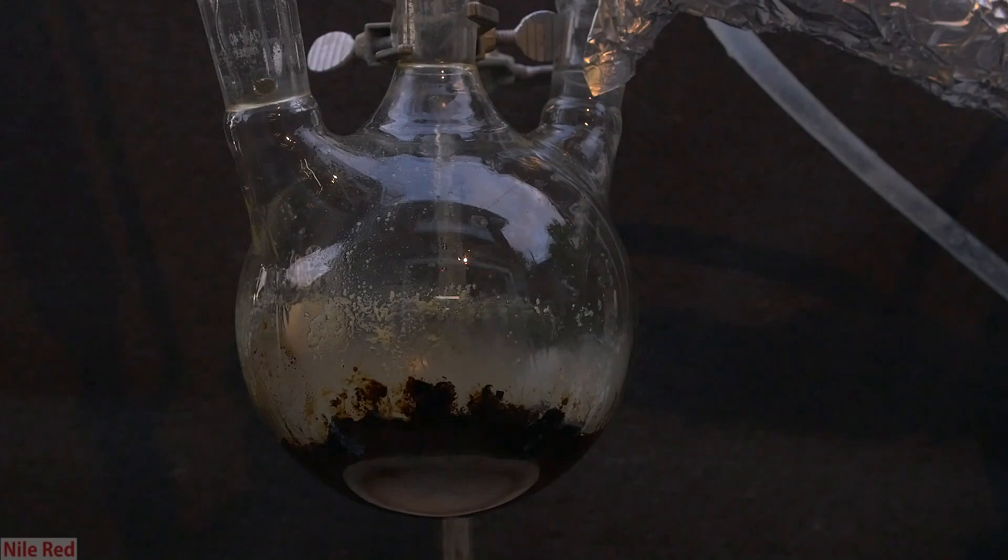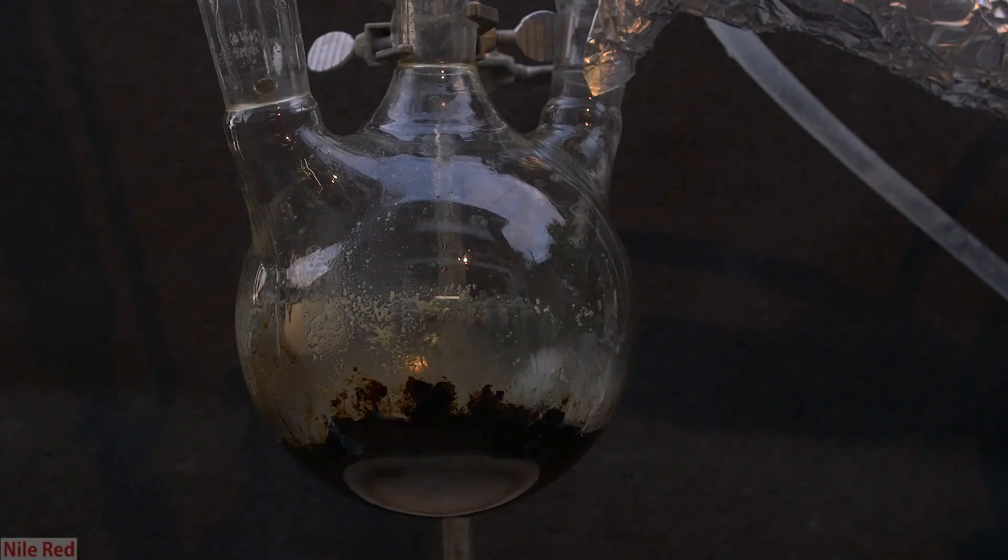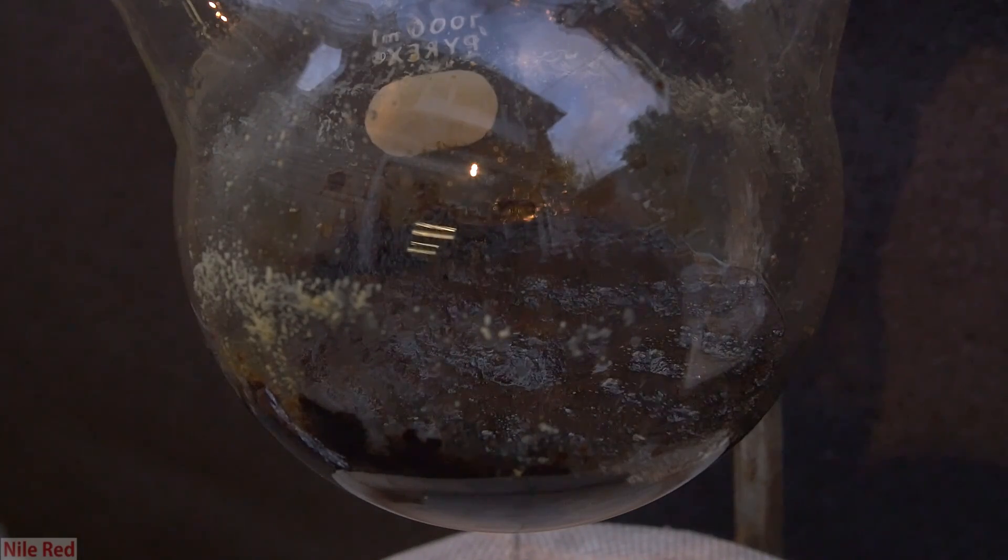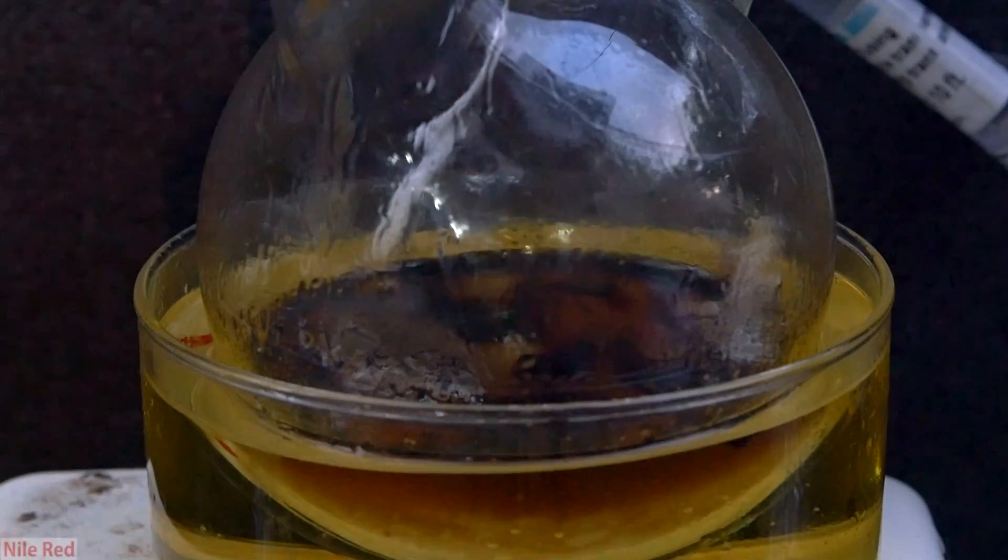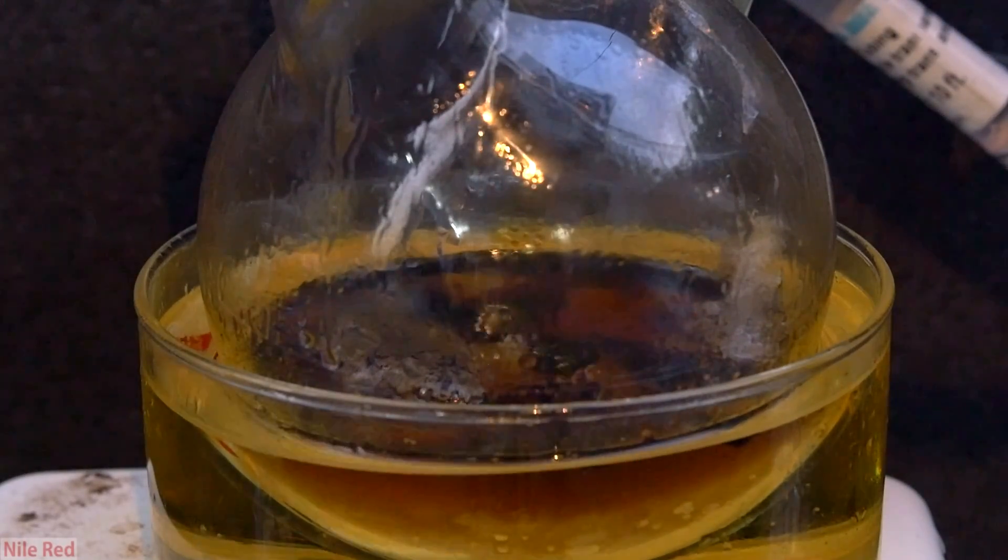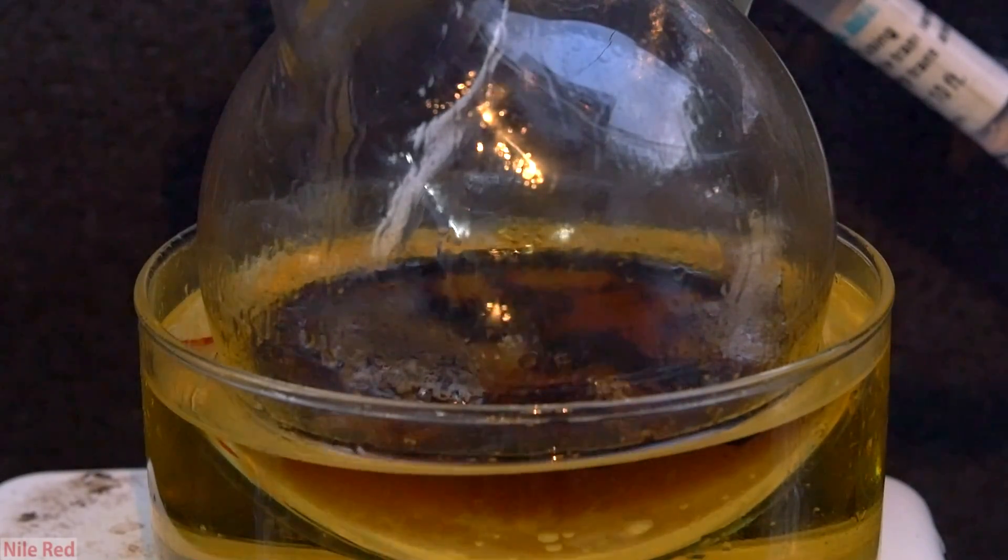Eventually we'll have added all of our glycerol, but we will reach a point where we stop collecting any acrolein in the final flask. The reaction flask is taken off heat, and when we look at it, it's kind of just a tarry mess. When we uncover the middle flask, we can see that it's collected a lot of water, and it looks pretty messy.